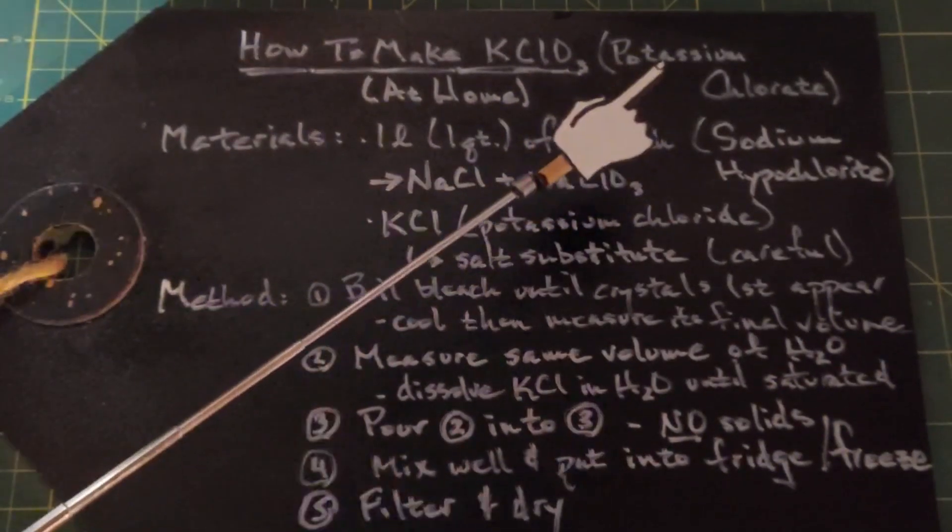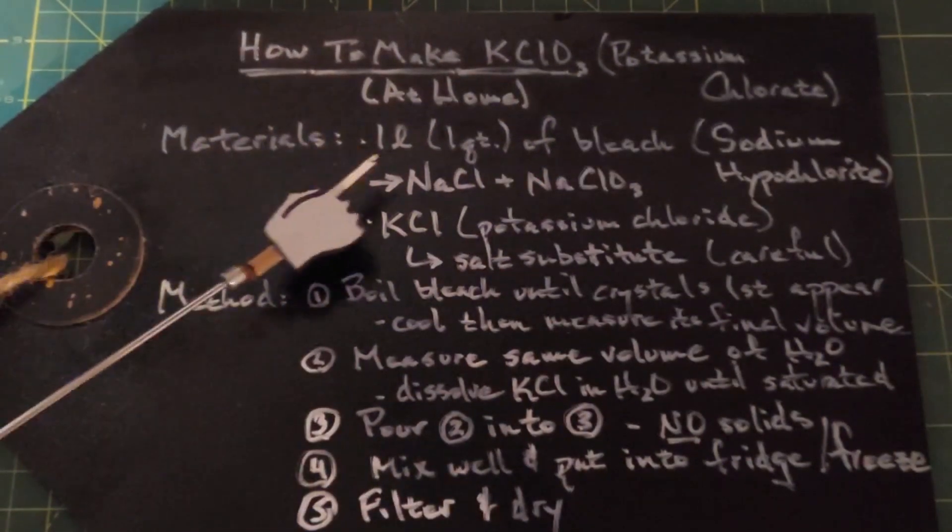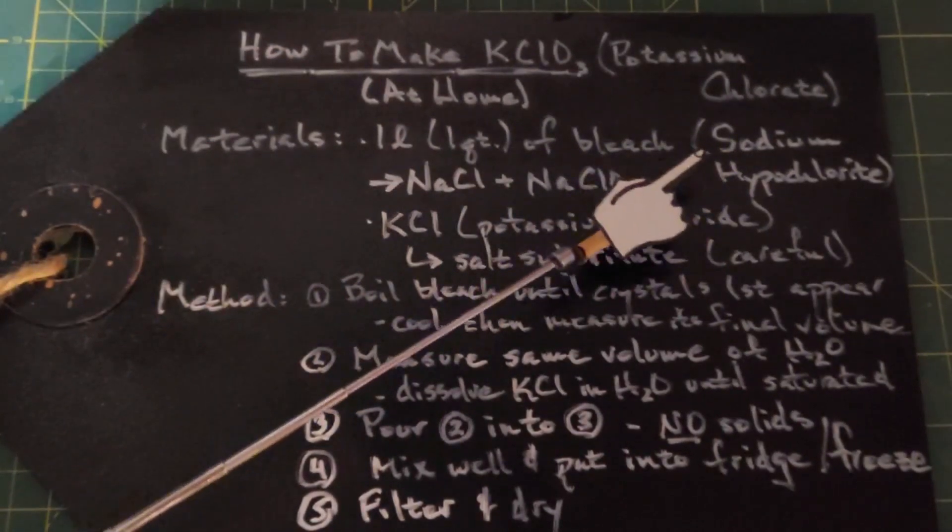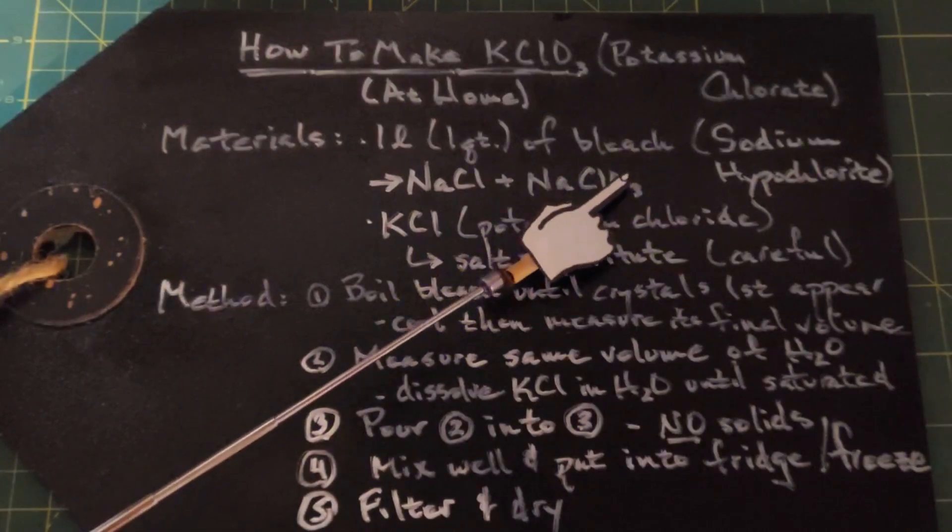The materials we need are one liter or a quart of regular bleach. Sodium hypochlorite is what it is, and don't use anything that's got splashless bleach or fragrance bleach. You want just plain old bleach.